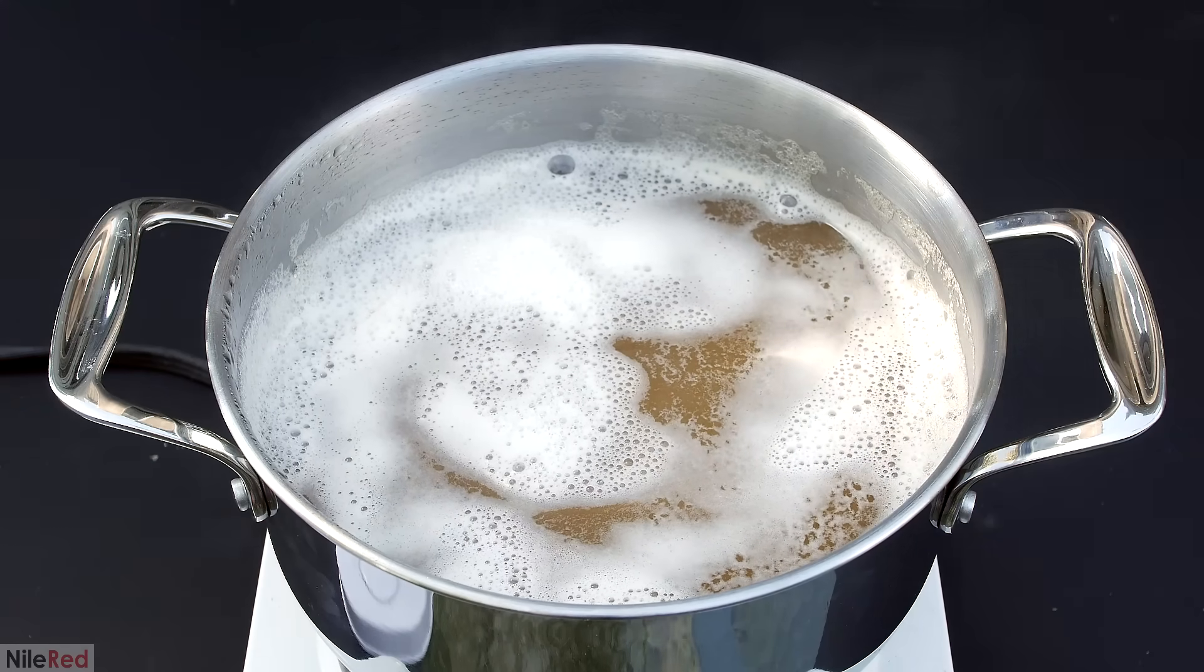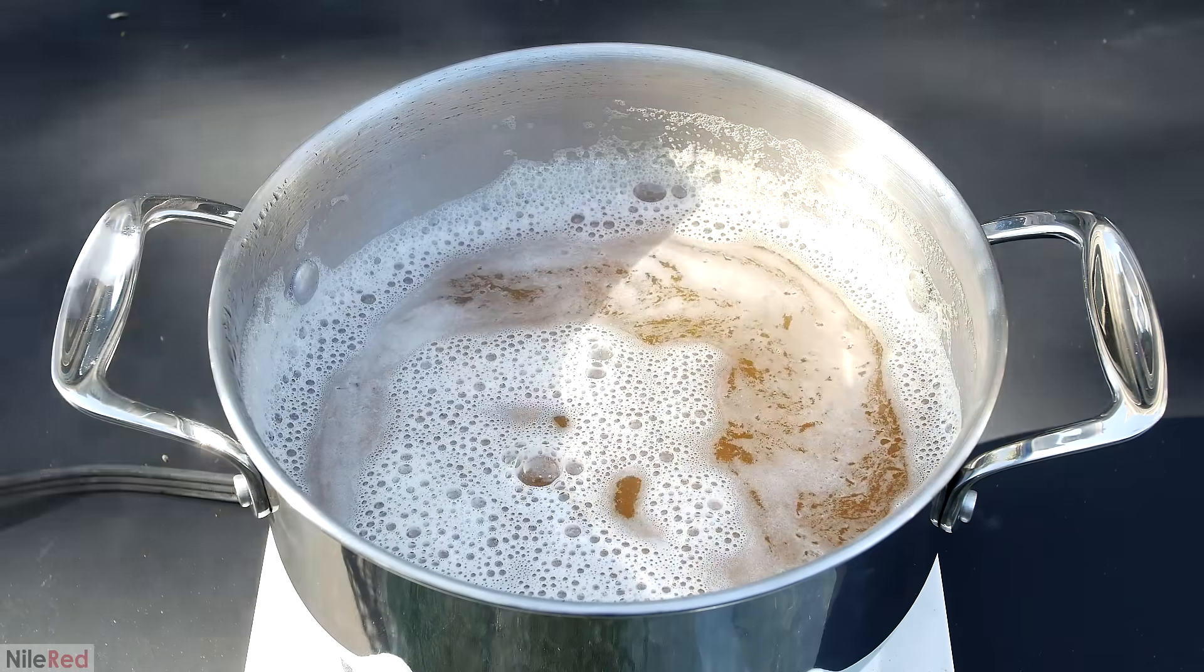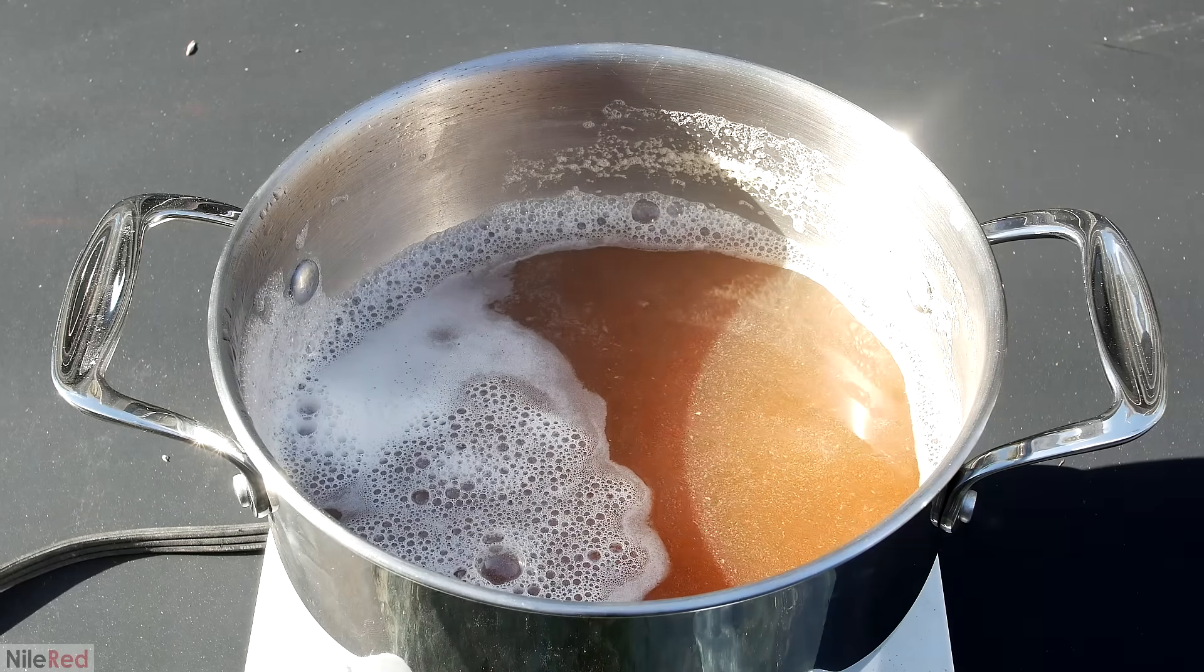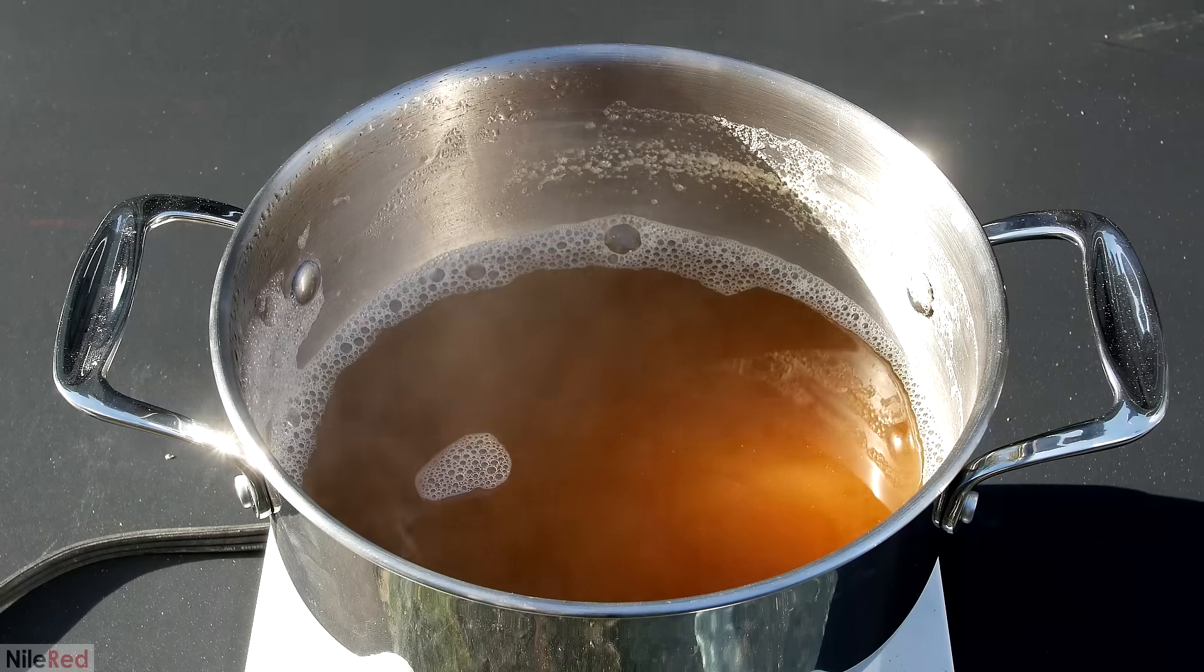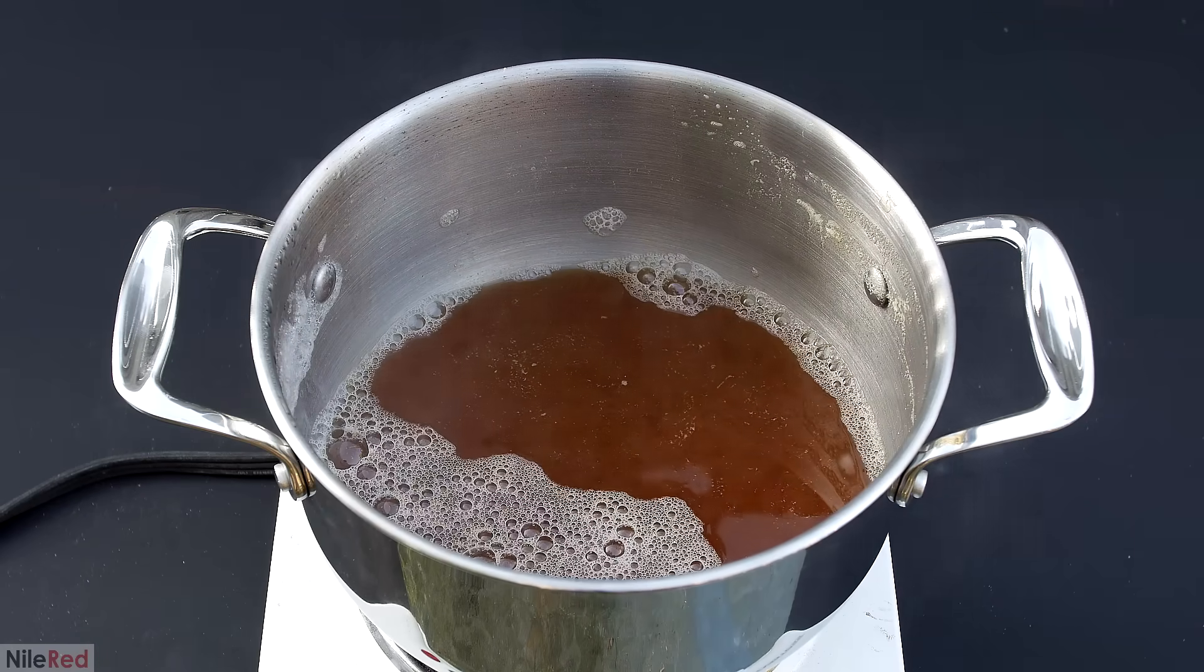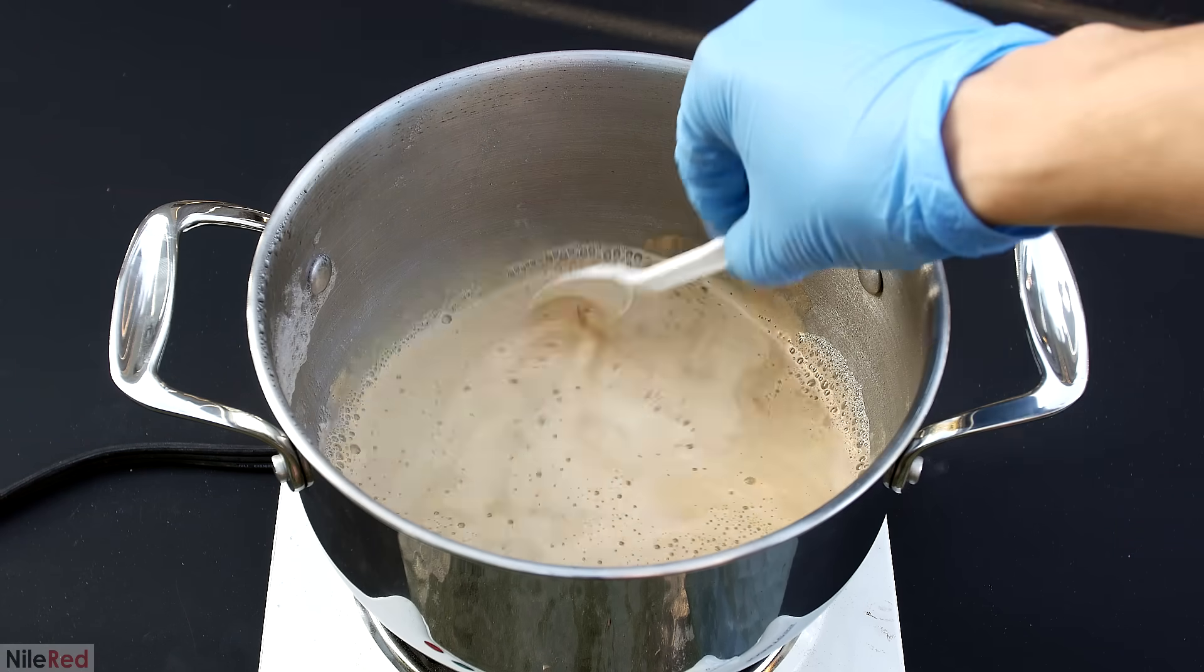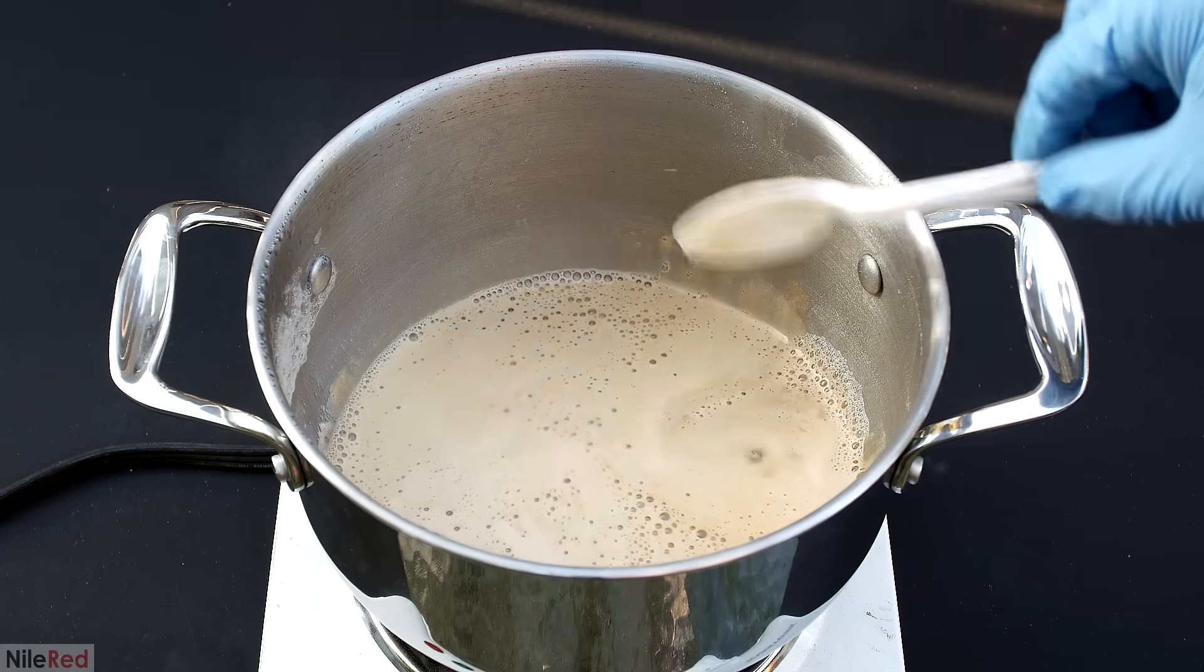The goal here is to get rid of almost all the water until I get to a volume around 150 to 200 milliliters. Surprisingly, at the beginning, it really wasn't that smelly, but it slowly got worse and worse. By the time that it was done, it absolutely reeked and was very unpleasant.